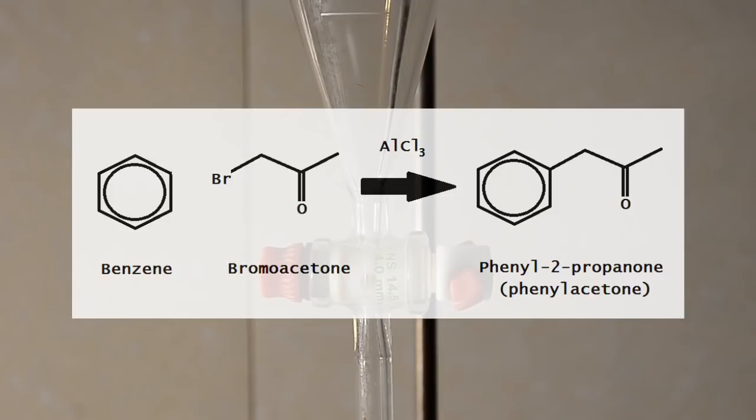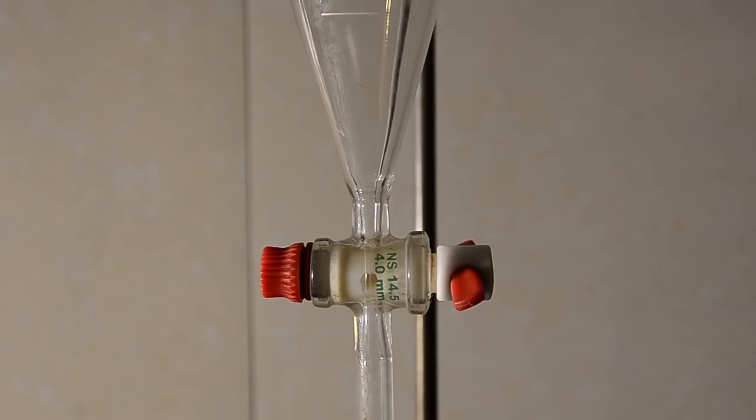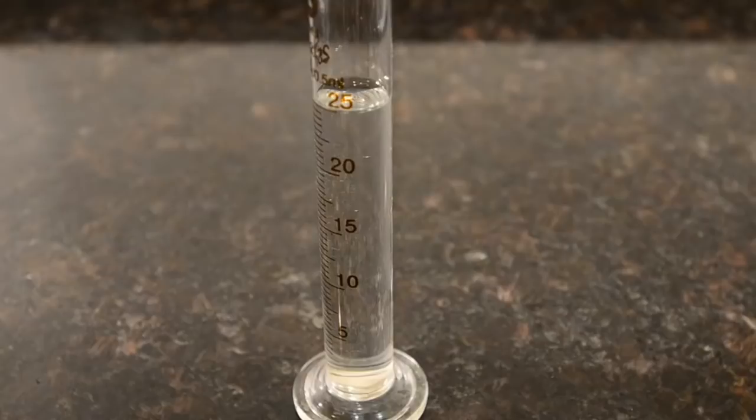This reaction involves a highly toxic and lachrymatory intermediate compound. We've found that a good way to handle this relatively safely is by doing the first step of the reaction inside a separating funnel. This minimizes exposure. But to do this experiment you will need serious ventilation, and preferably a face mask and breathing apparatus. Let's get started.